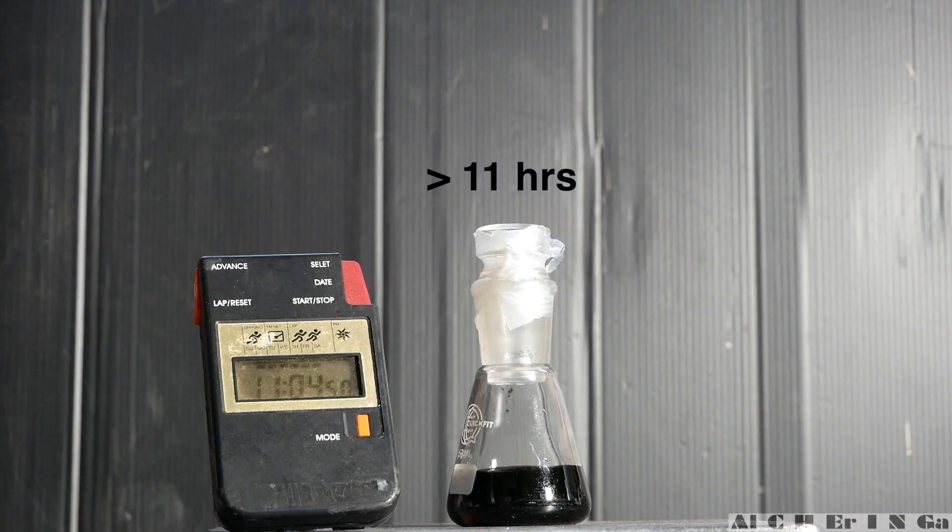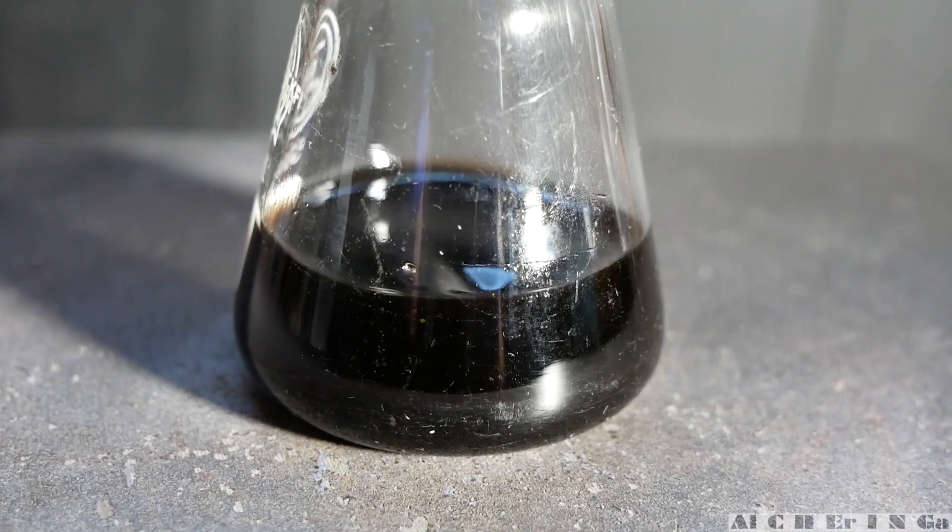After 11 hours, we can observe that the mixture still has a black color and there is no other visible reactions taking place.